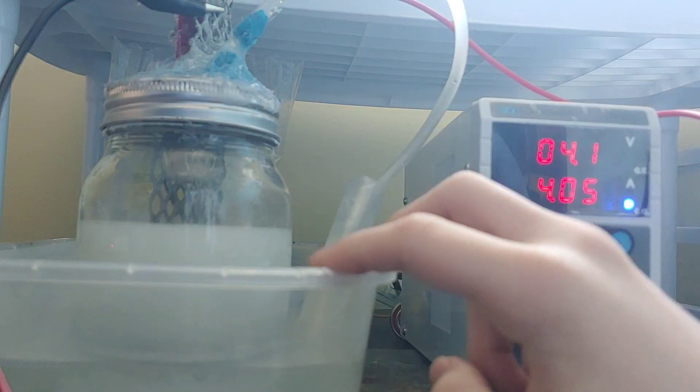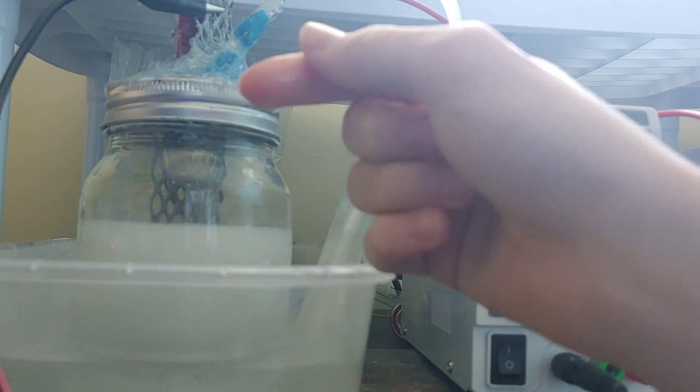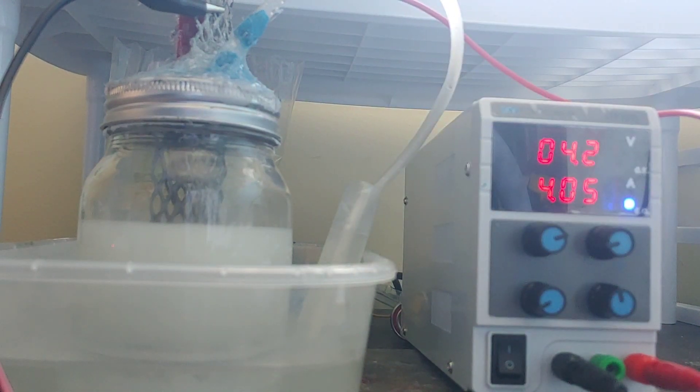And in case you're wondering, yes, I have a little ice cream container over here. There's some hot water in here. The reason I have hot water in this is to keep this cell hot, because apparently, the hotter it is, the better. Again, Science Madness forum. What can I say?